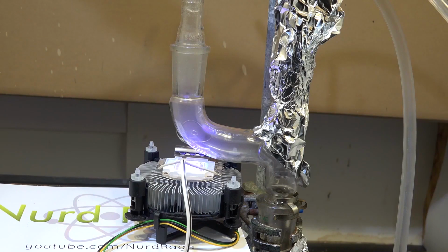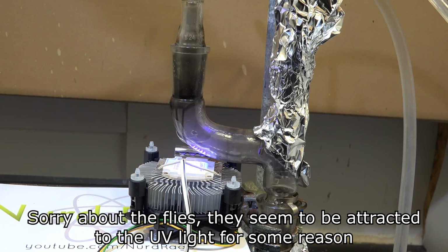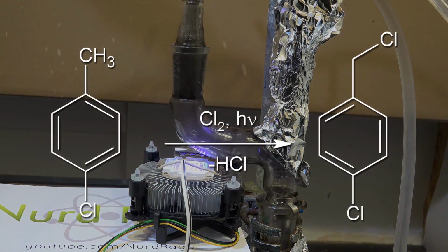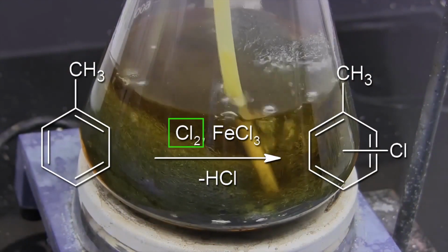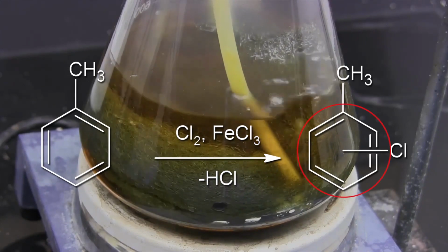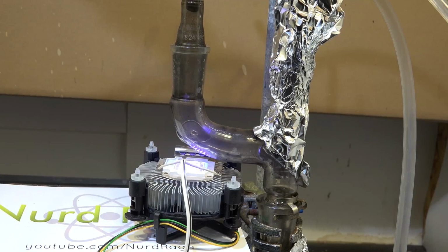The hydrogen chloride gas escapes out the top of the column, but the high boiling p-Chlorobenzyl chloride condenses and drips down into the flask. Since it has a higher boiling point than p-Chlorotoluene, it should stay in the flask and never get chlorinated. Now what's interesting about this reaction is that it only chlorinates the methyl group, not the ring. In contrast, when we were making chlorotoluenes, we also used chlorine gas, but by using an iron chloride catalyst rather than UV light, we chlorinated just the ring. This demonstrates the importance of selecting the right reaction conditions to influence the mechanism you want.